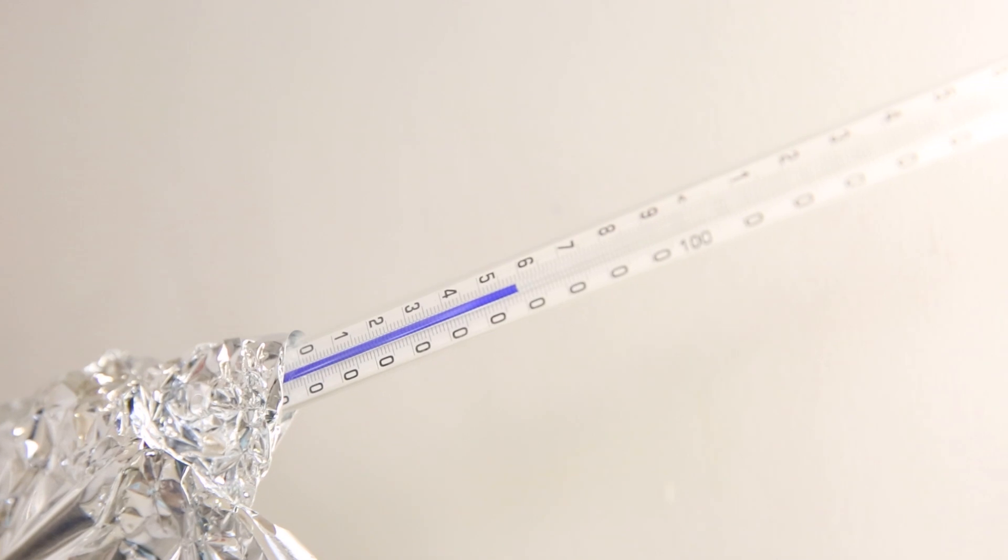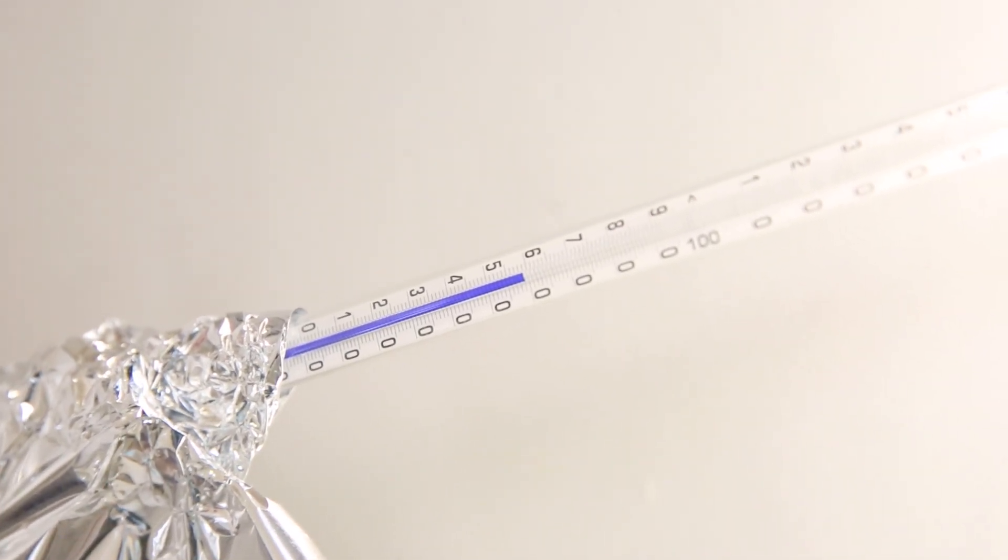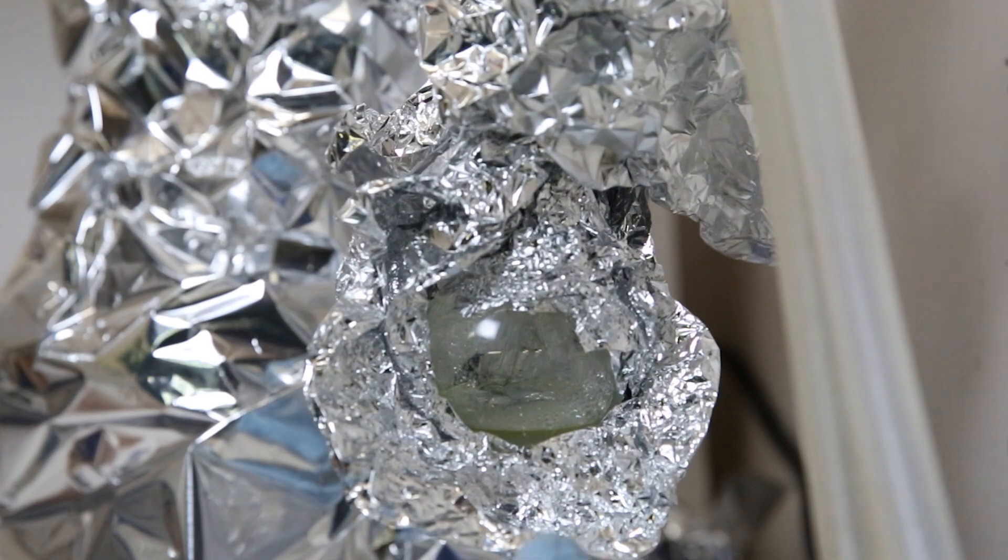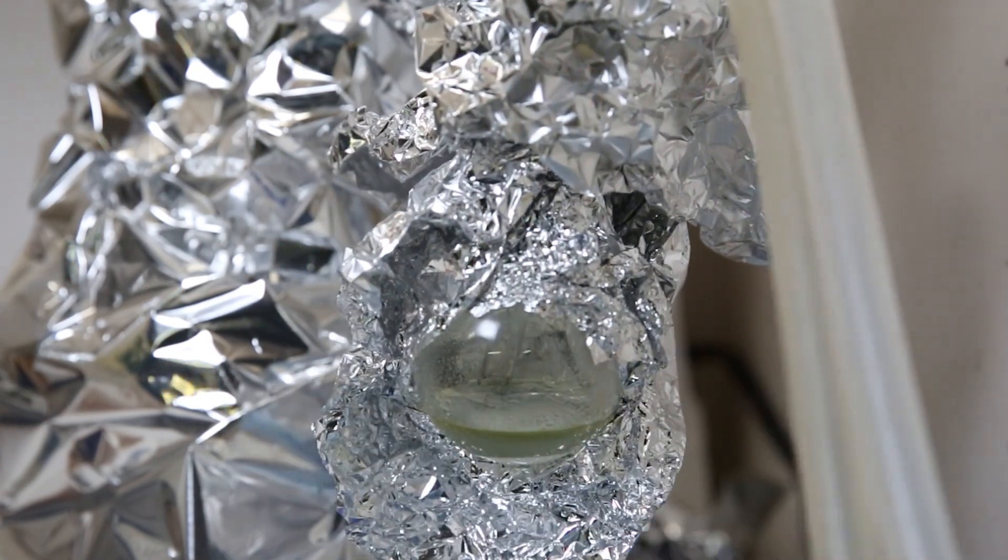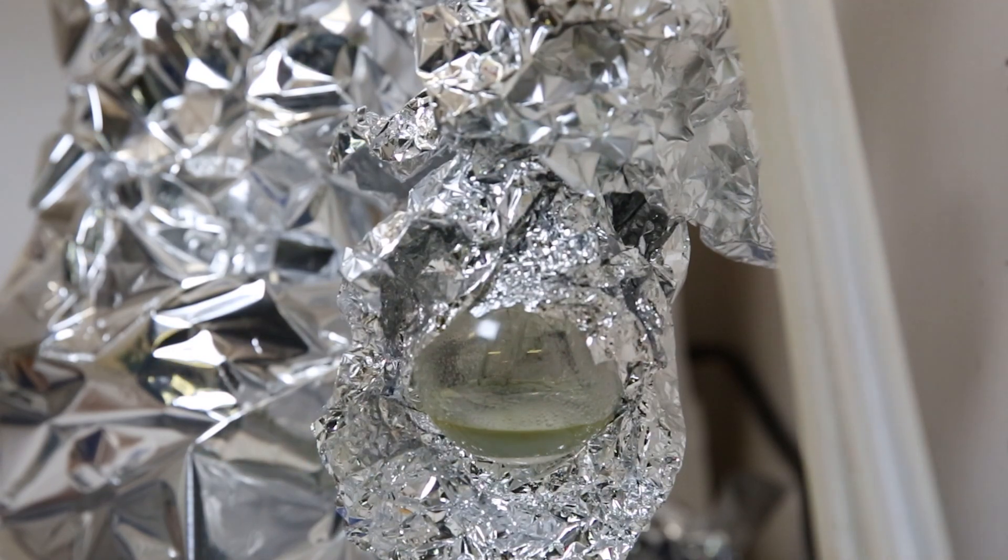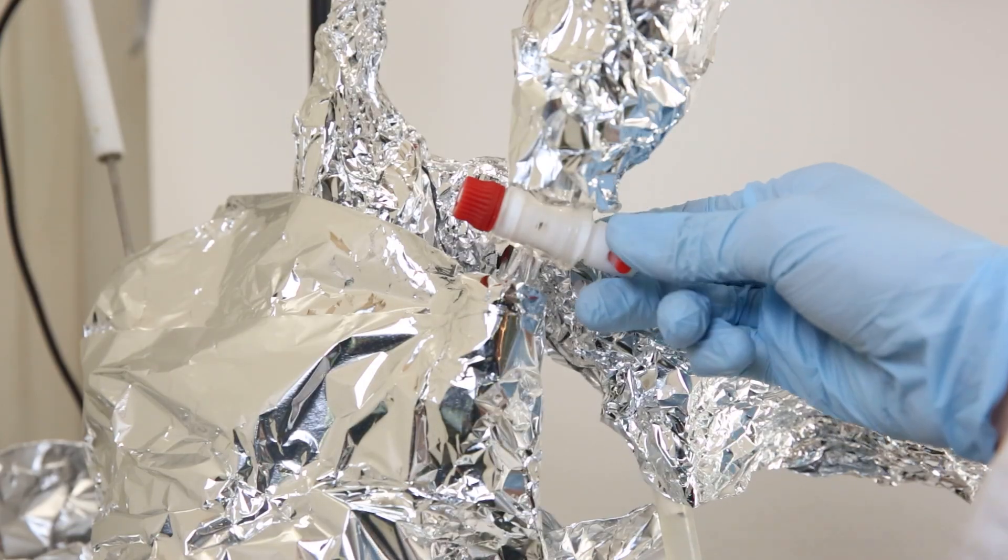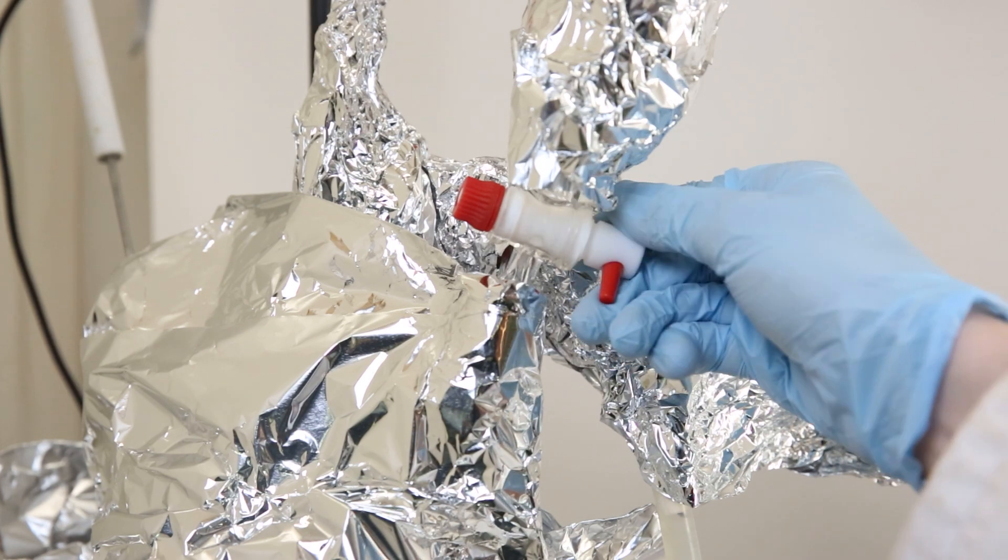A little while later, the thermometer in the short pass started to read around the boiling point of Acrolein. So I check the flask and we can see liquid has already started coming over. Knowing that we are now receiving liquid in our second receiving flask, I can start opening the addition funnel and let the glycerol slowly drip in.